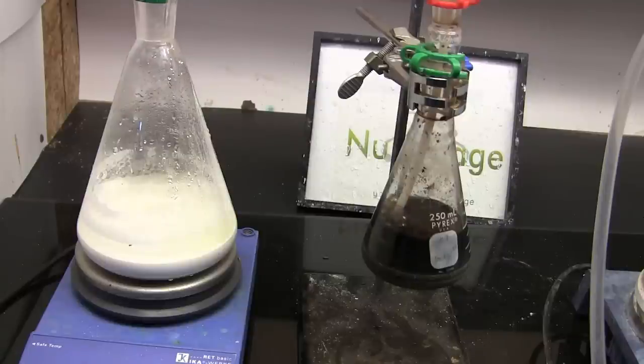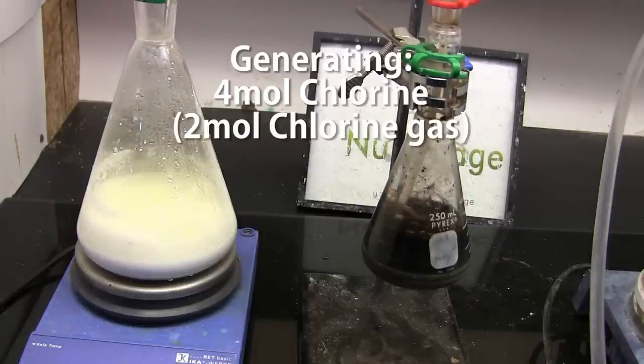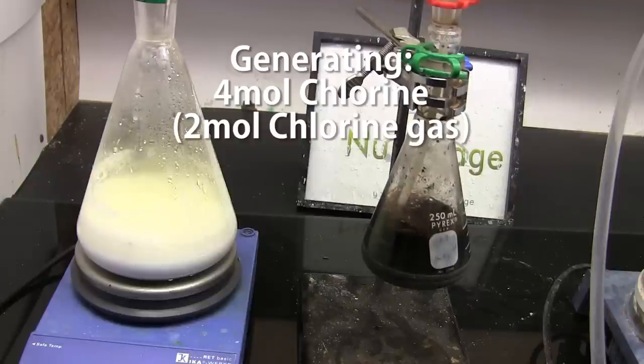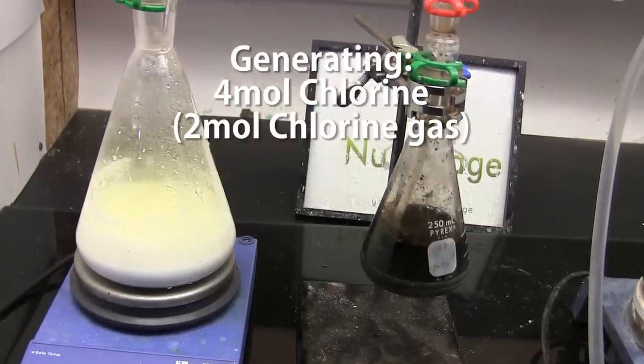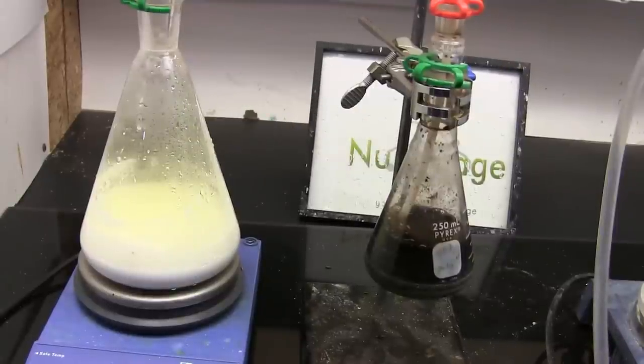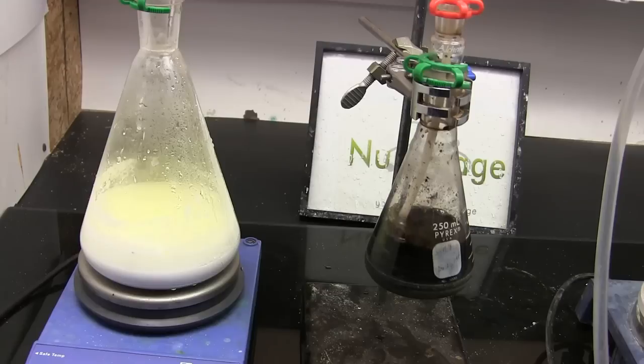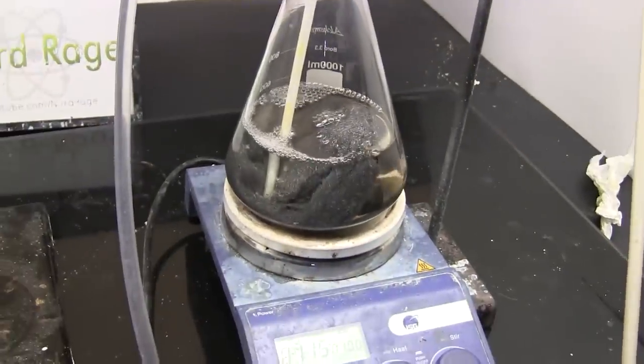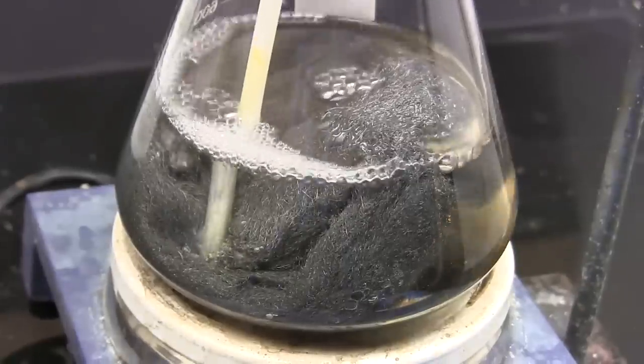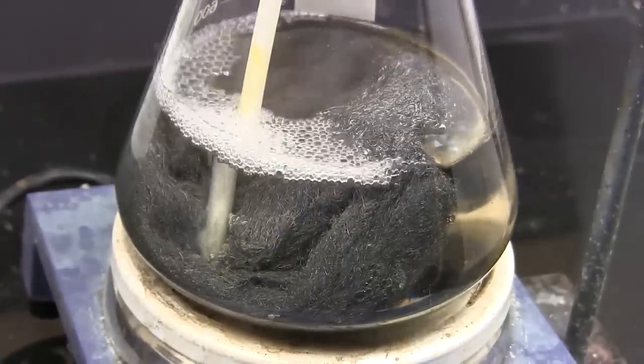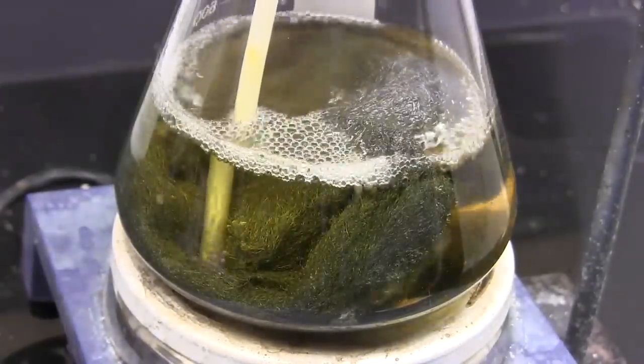First we drip in the hydrochloric acid and we can see the yellow chlorine gas forming. I'm using enough reagents to produce four moles of chlorine atoms or two moles of diatomic chlorine gas. Go slowly as the toluene mixture can only absorb so much gas at a time. Moving over to the toluene, it'll take a minute or so for the air to purge out the tubes before the chlorine gets to the toluene. And there we go.